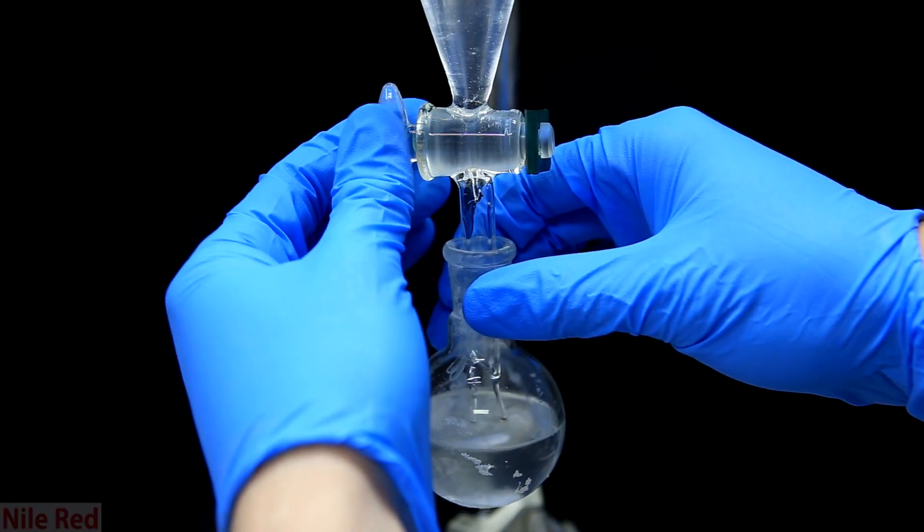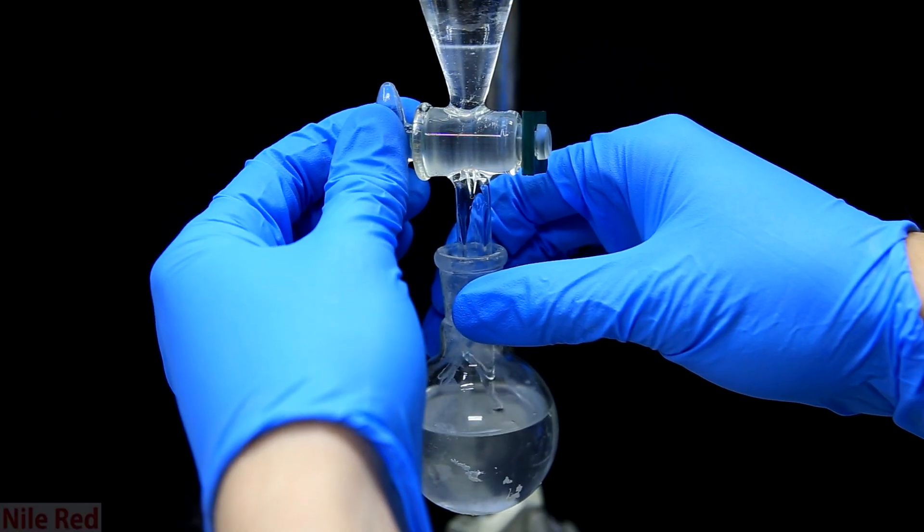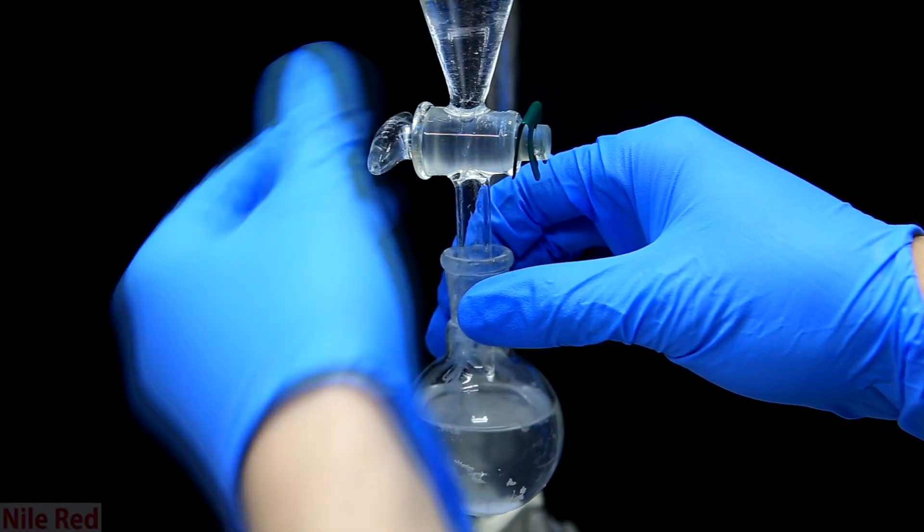So just like before we cap, shake and vent it, let the layers separate and then the waste aqueous layer is drained into a flask.